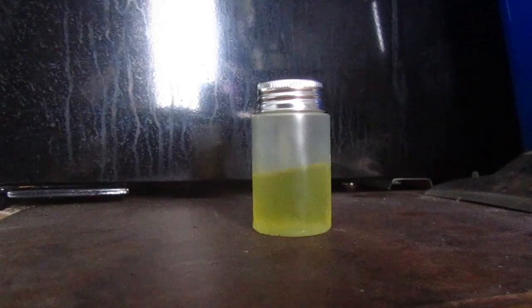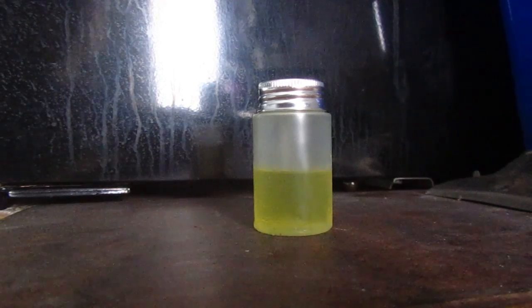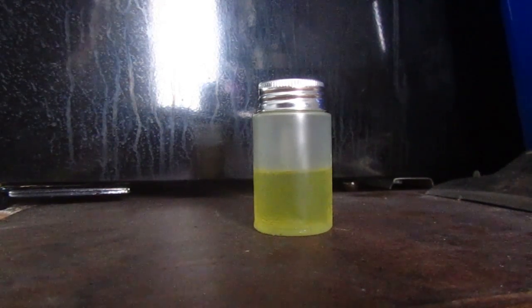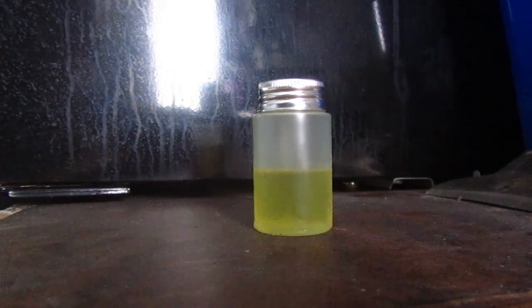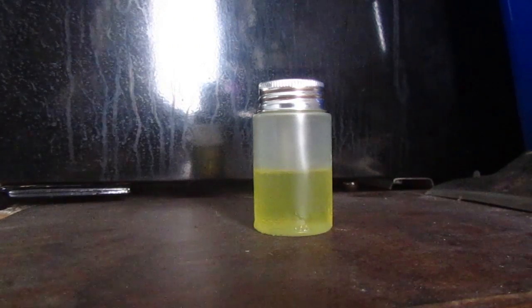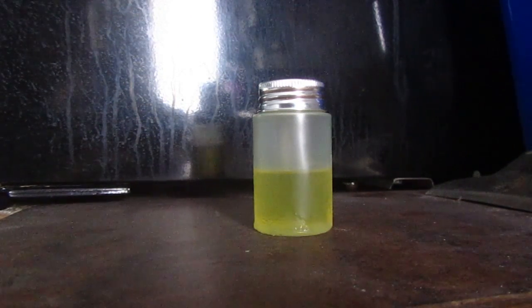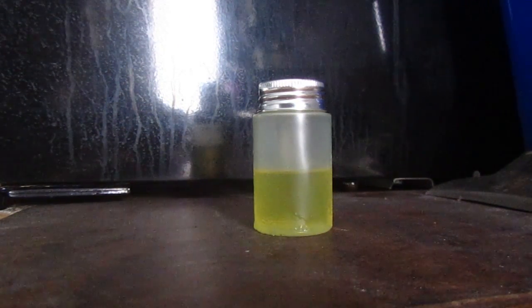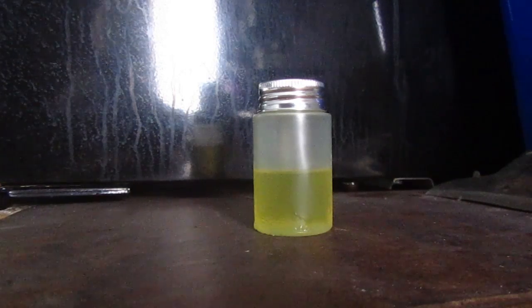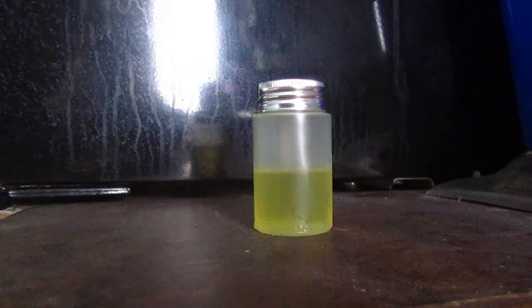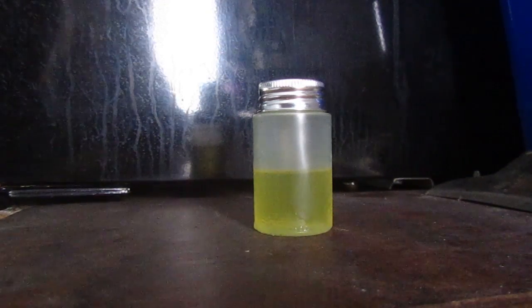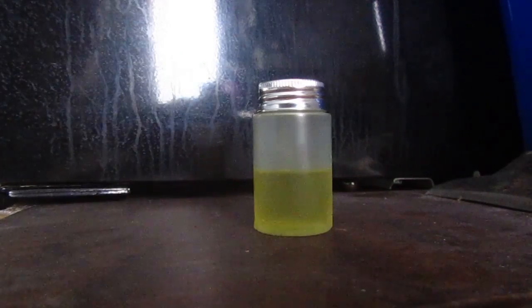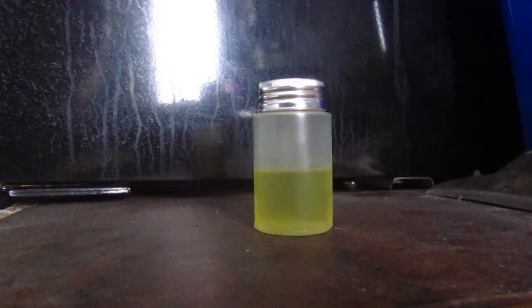Hello, today I'm going to show you some nitrite, nitrite, I-T-E. It's a group of chemicals called alkyl nitrites, and they're very volatile, extremely flammable, and they are overall pretty cool. So I'll show you some stuff.